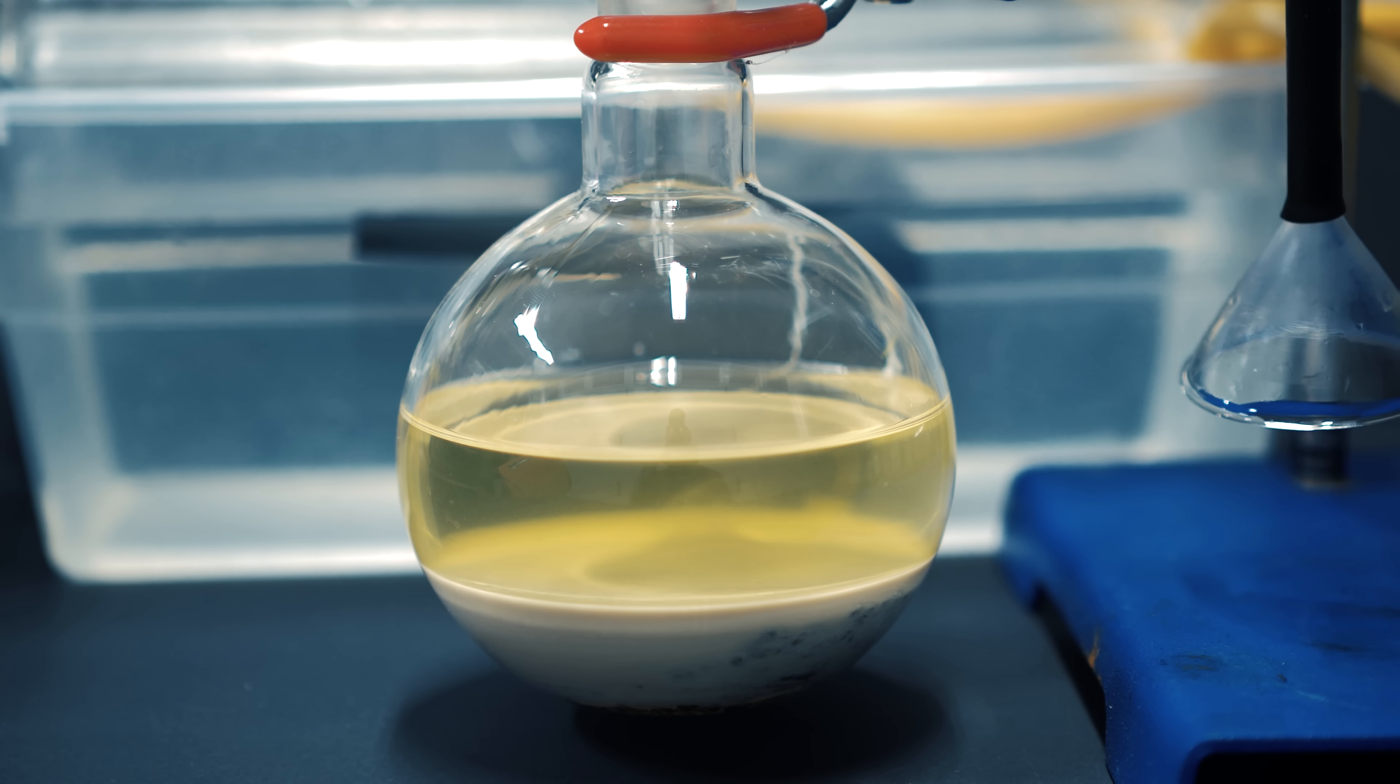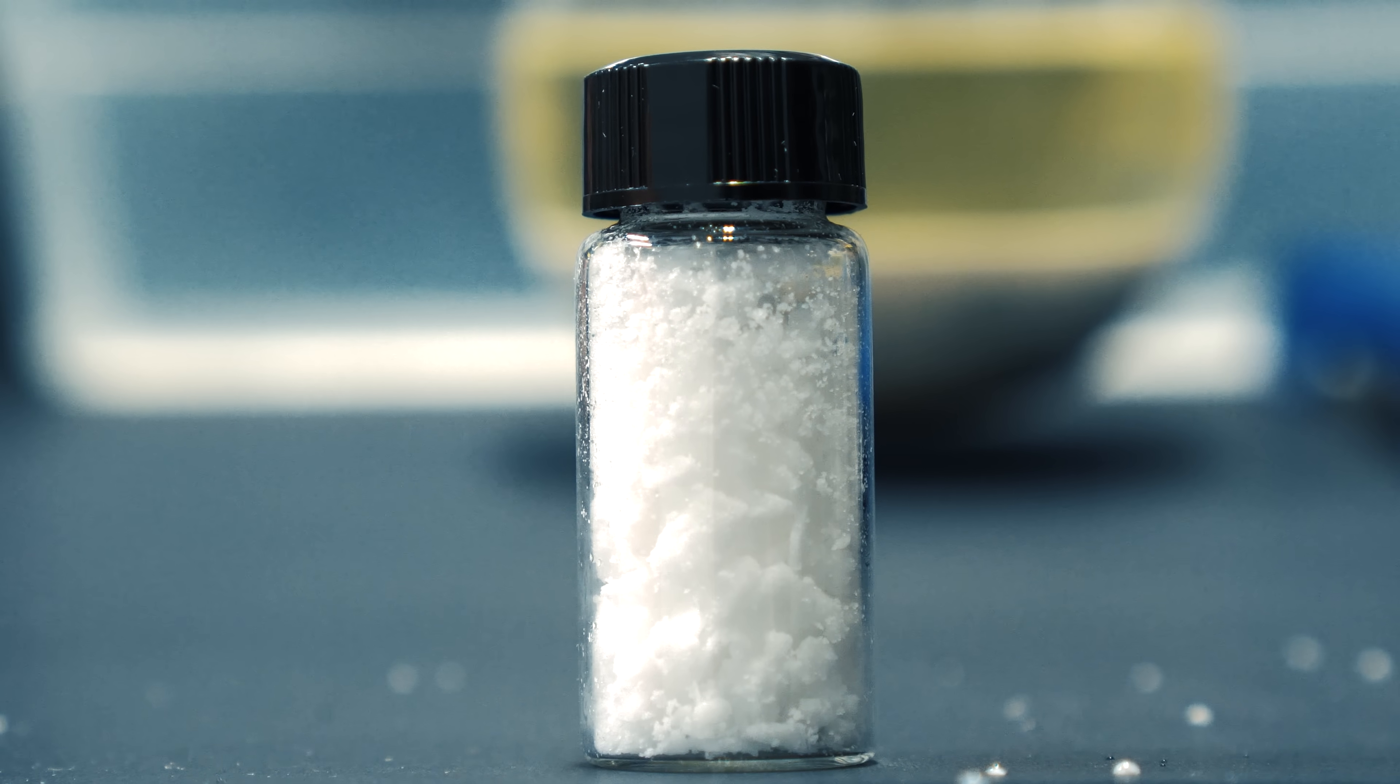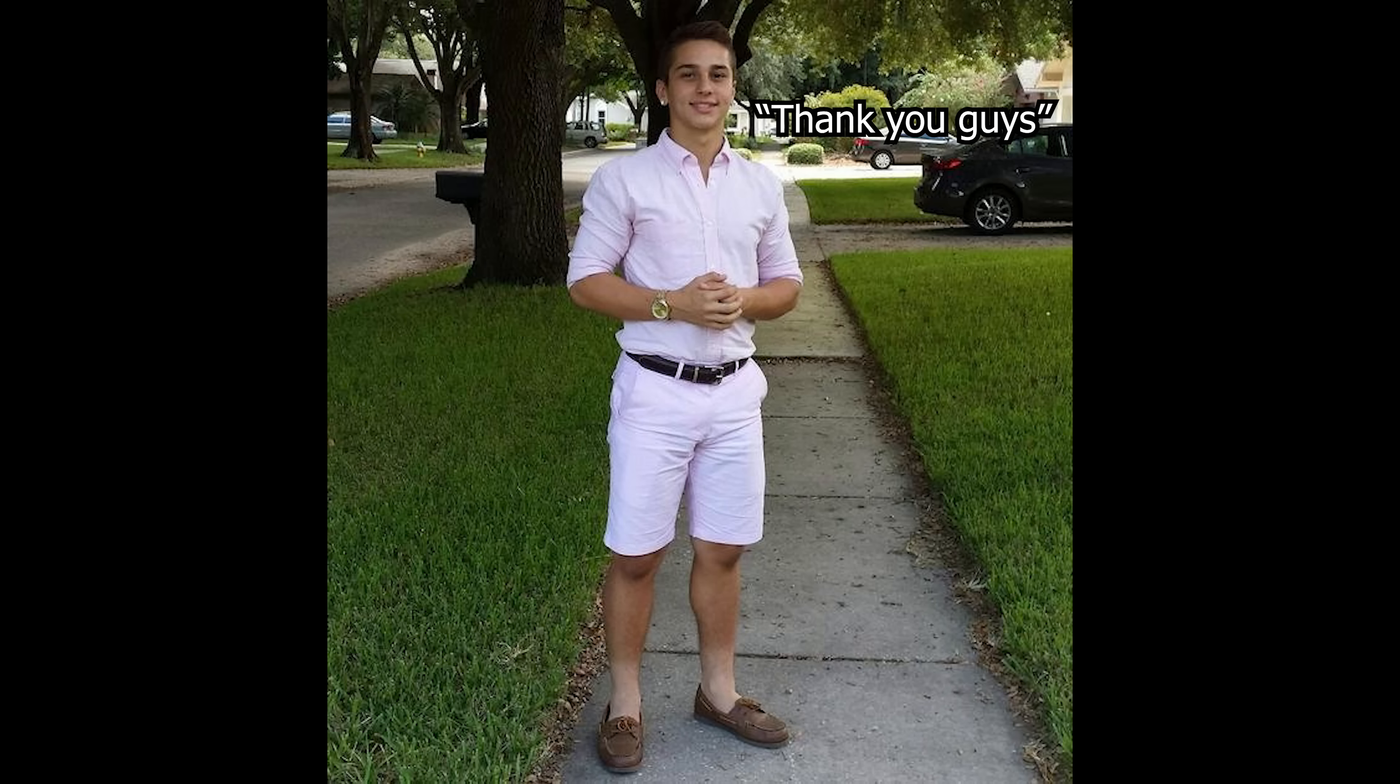This is what the reaction flask looked like once I let it settle. There's a lot of byproducts and unreacted tin that's inside there. I'm not entirely sure what I'm going to do with it as I have no need for it, though I heard there's a chemistry teacher with stage 4 lung cancer that could be in use of it. Thank you everyone for watching, I hope you enjoyed it, and also another huge shoutout to all my Patreons.